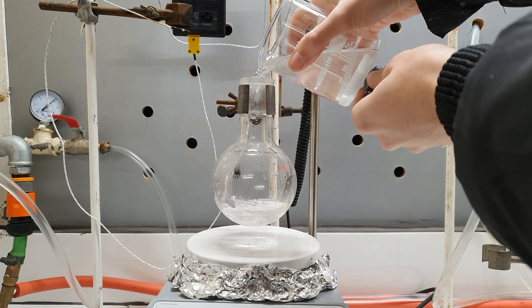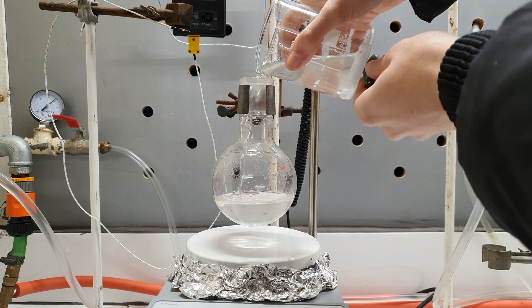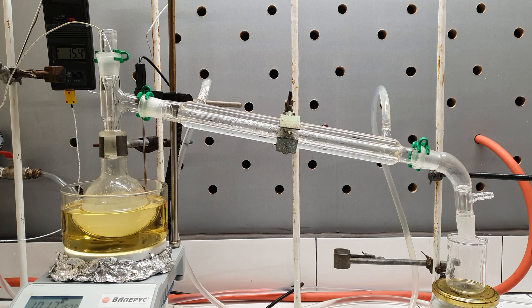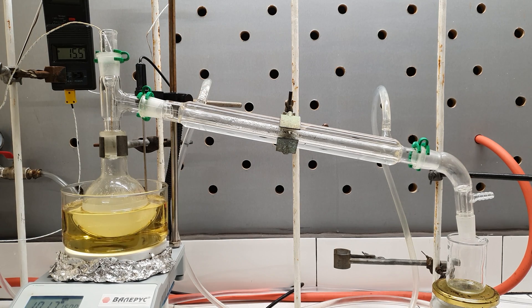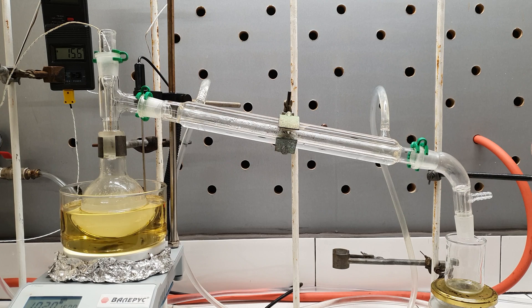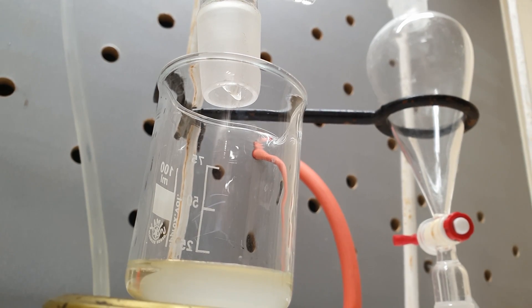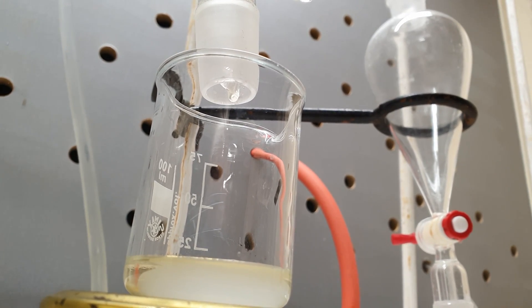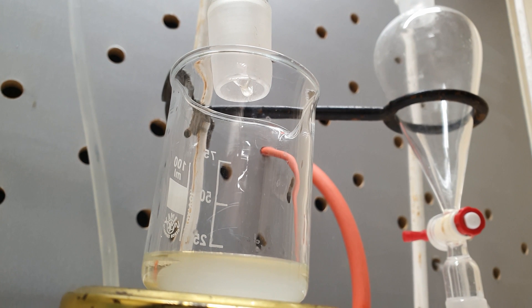Then the solution was transferred in a round bottom flask and a distillation carried out. Soon a cloudy liquid started to distill, which again separated into two layers.